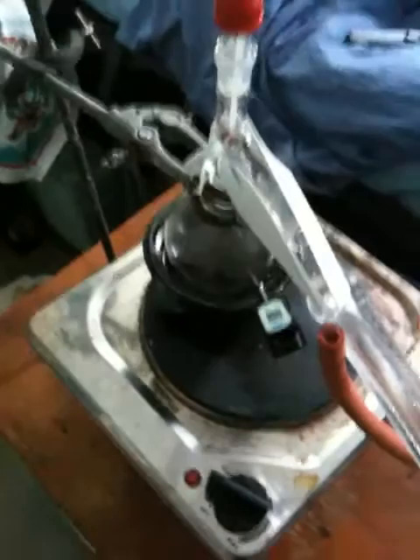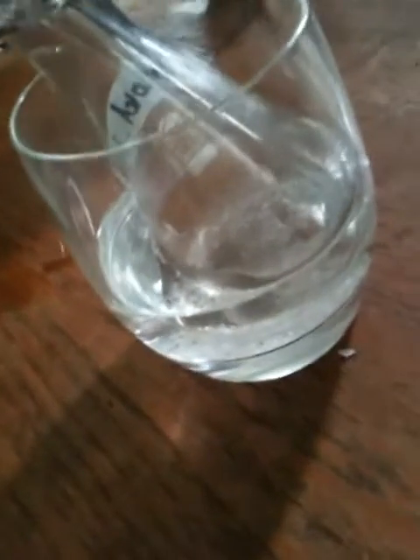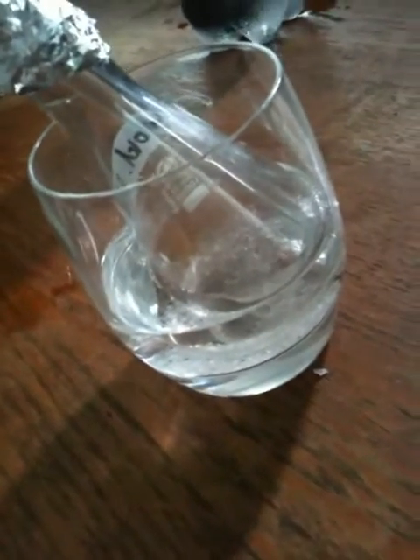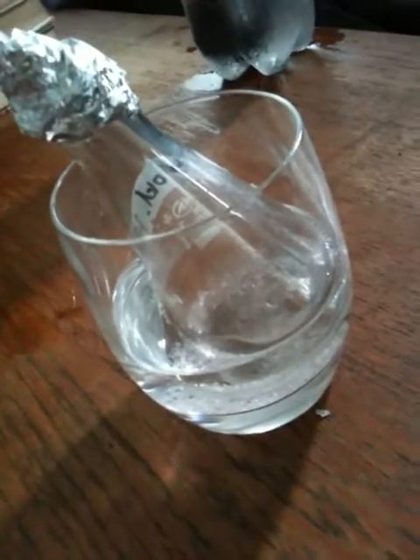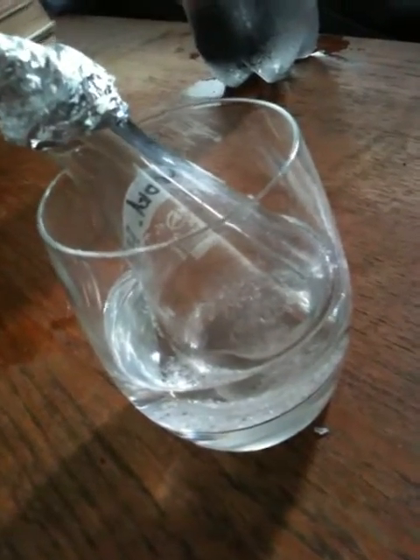I'll come back and show you when everything's distilling. Also, before I go, I've put some salt and a little bit of water, and I'm going to crush up some ice and put it in there. The salt, ice, and water should bring the temperature down below freezing, which would be good for holding the collected fresh chloroform or whatever chloromethanes I get.